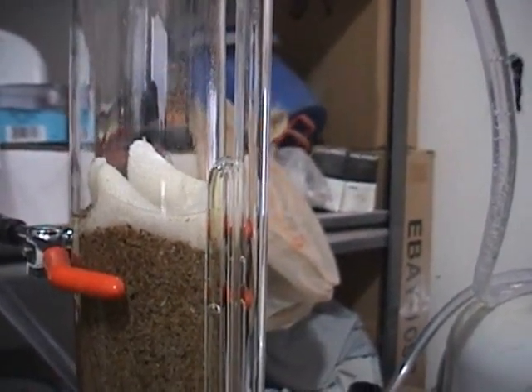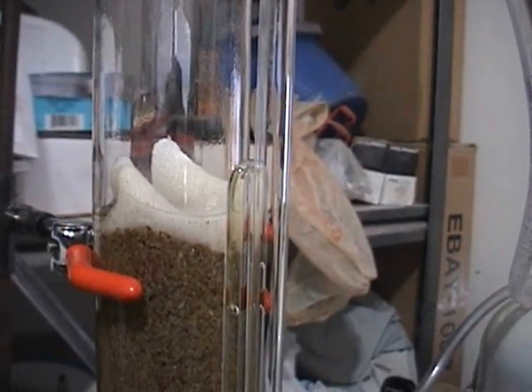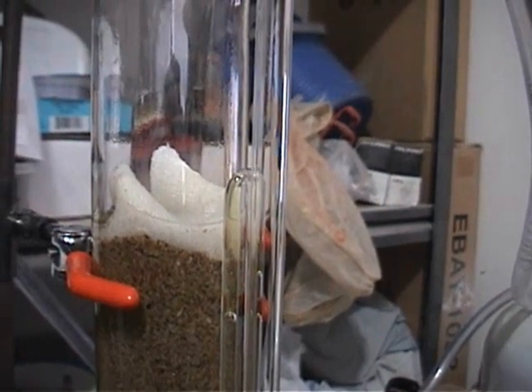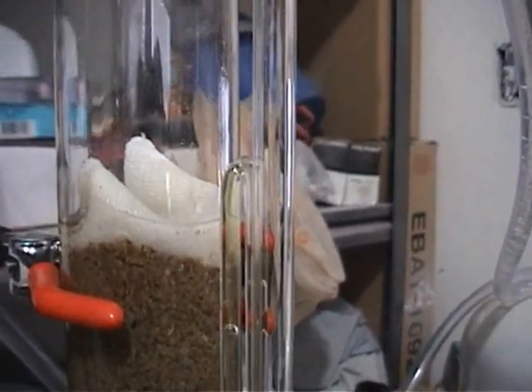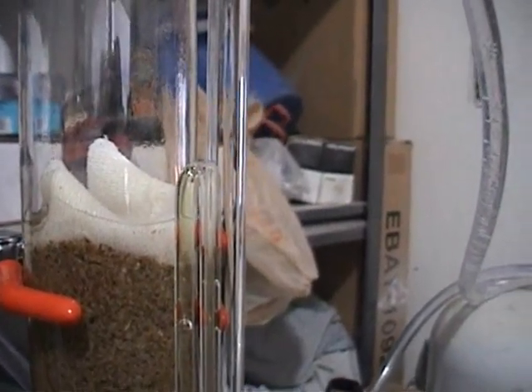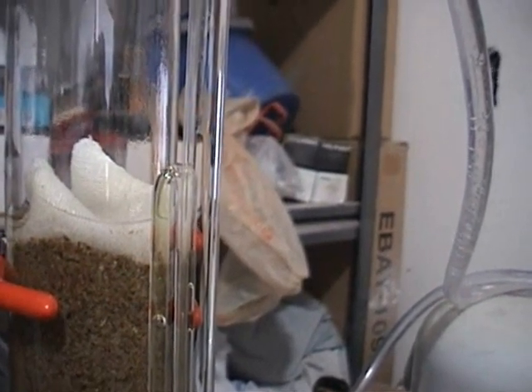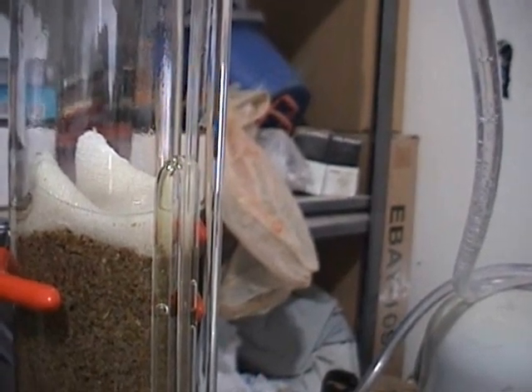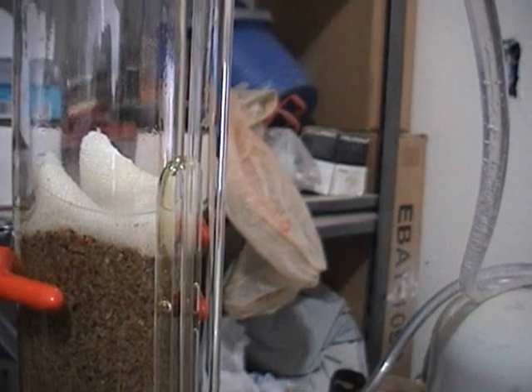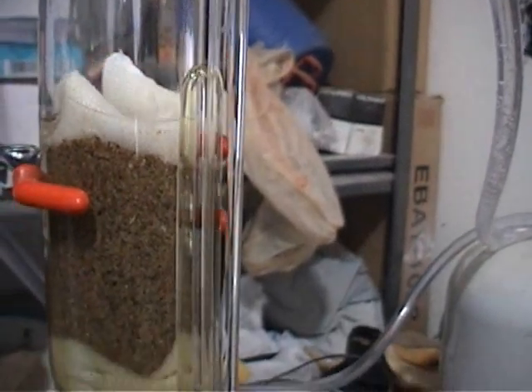Trying to capture that magical moment here. The drips are trying to overcome the inertia and the natural draining of the fluid to get the cycling started — and there she goes.